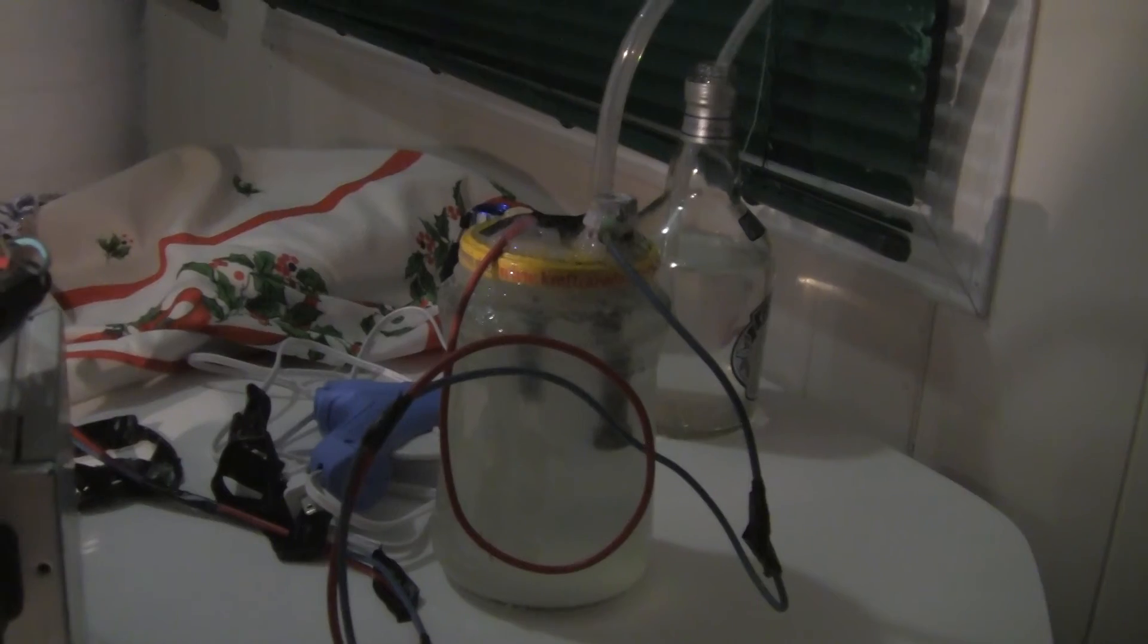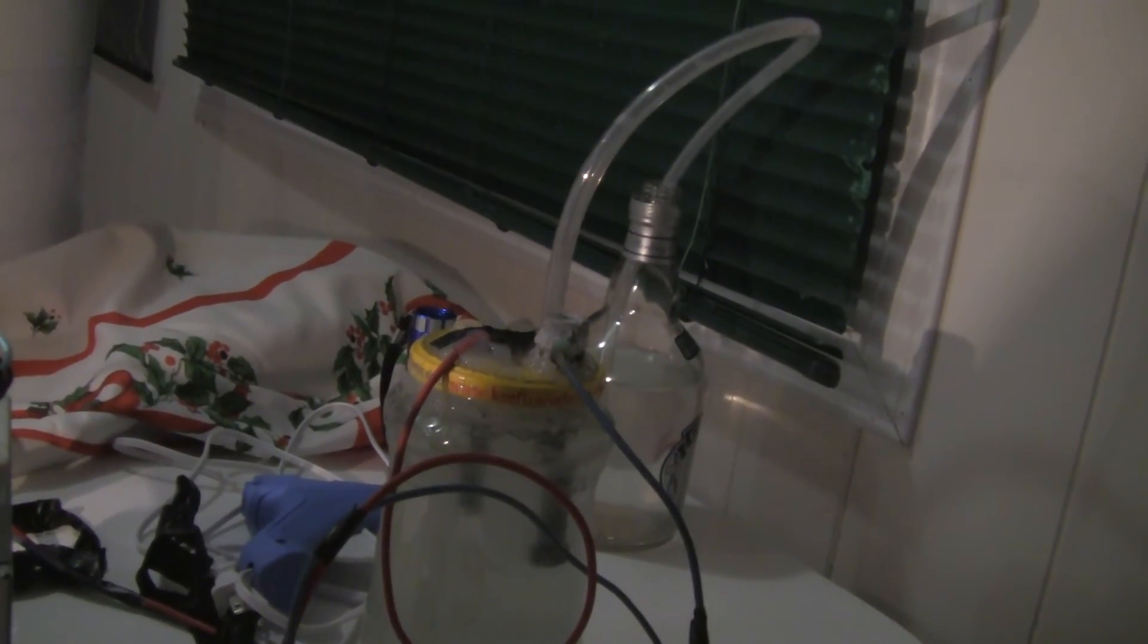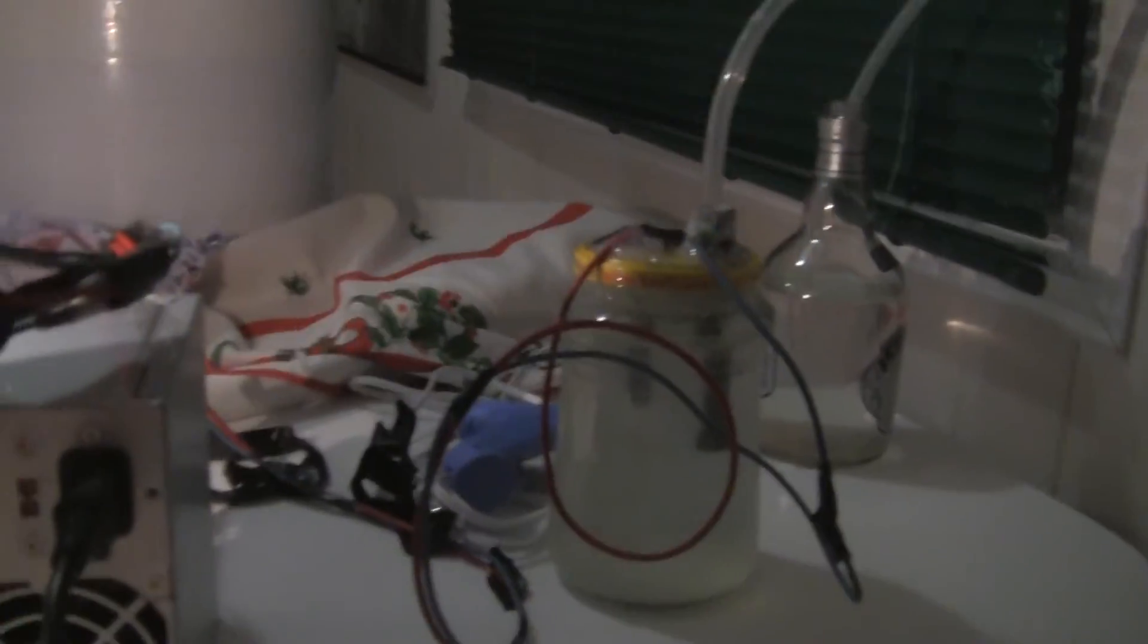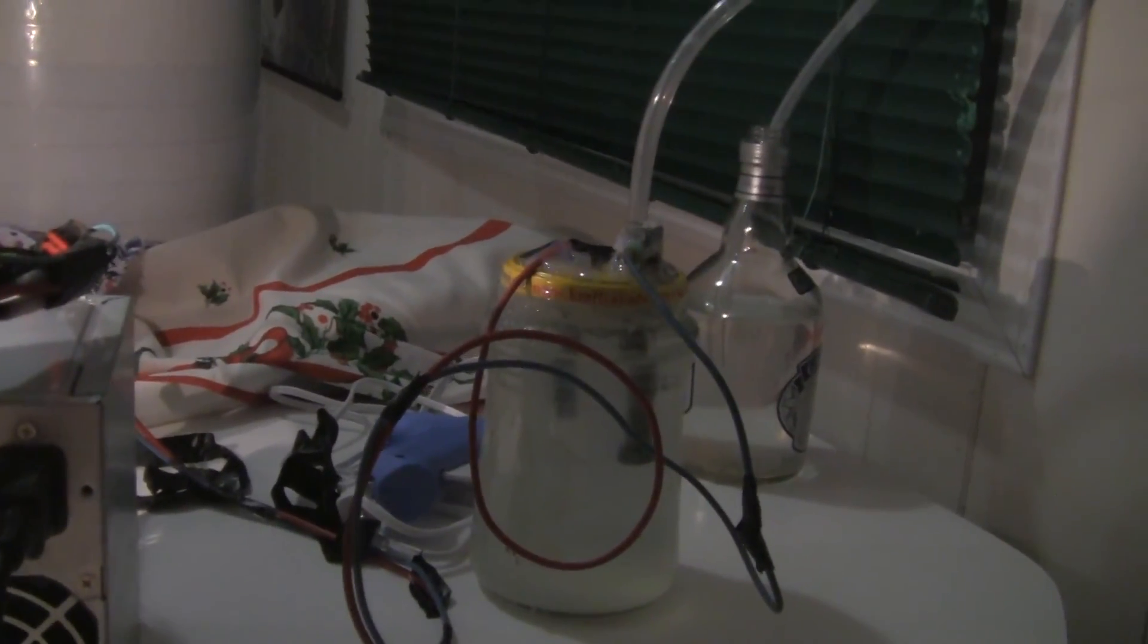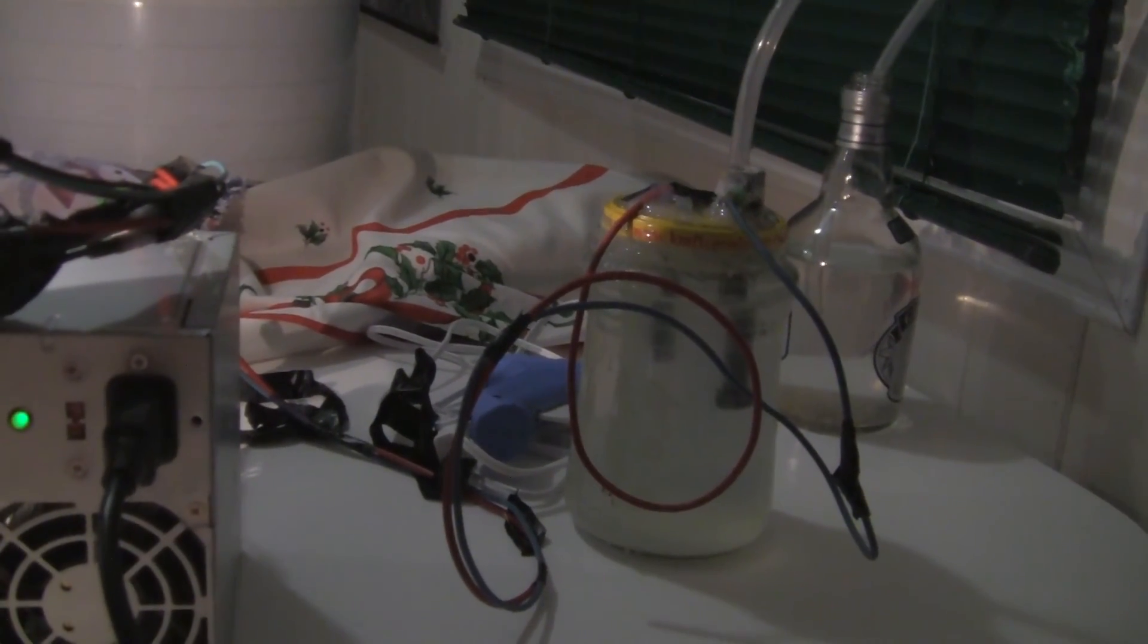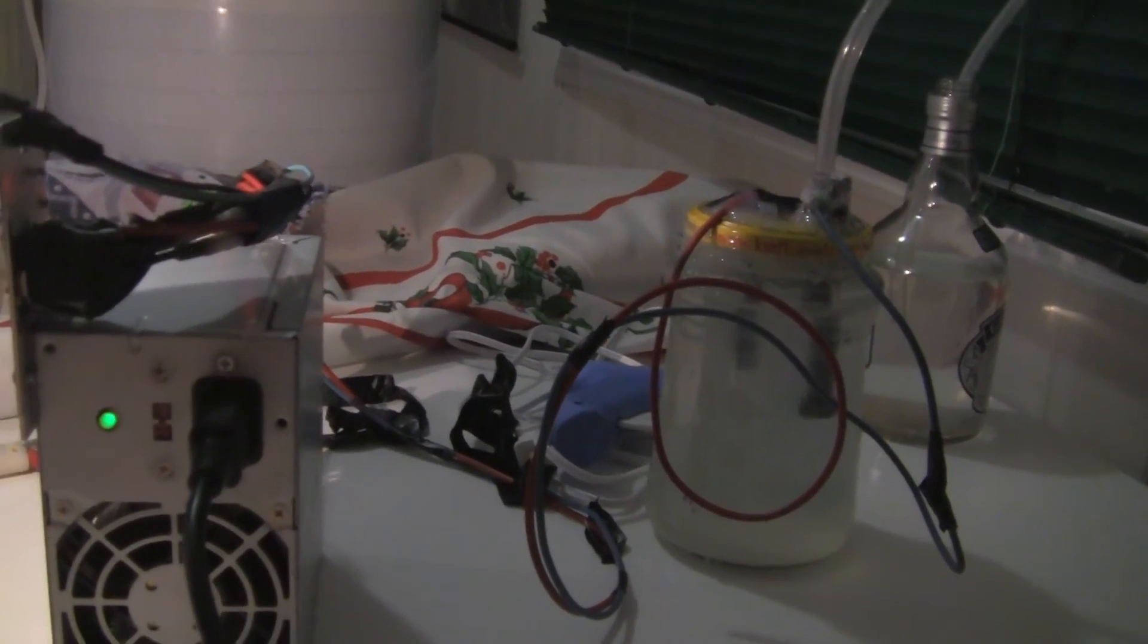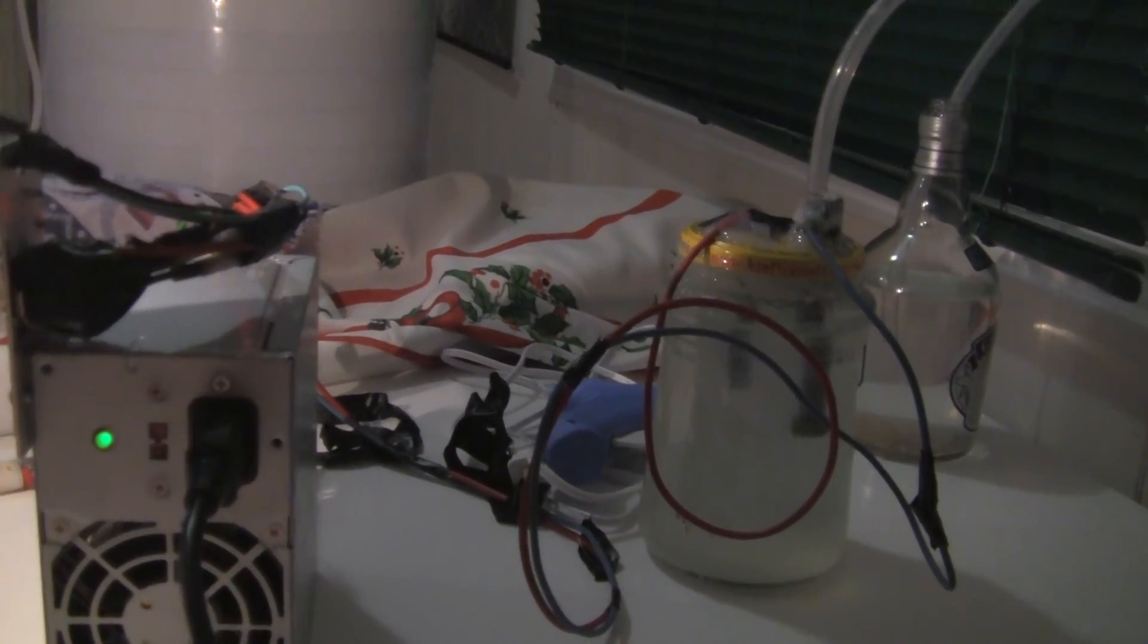I'm waiting on an MMO anode and cathode set coming from, I can't remember what website I found it on, but it's like seven inch diameter. It's kind of a circular shape, one fits inside the other one. It looks like it'll be great. They're actually on sale now, 100 bucks as opposed to 150.